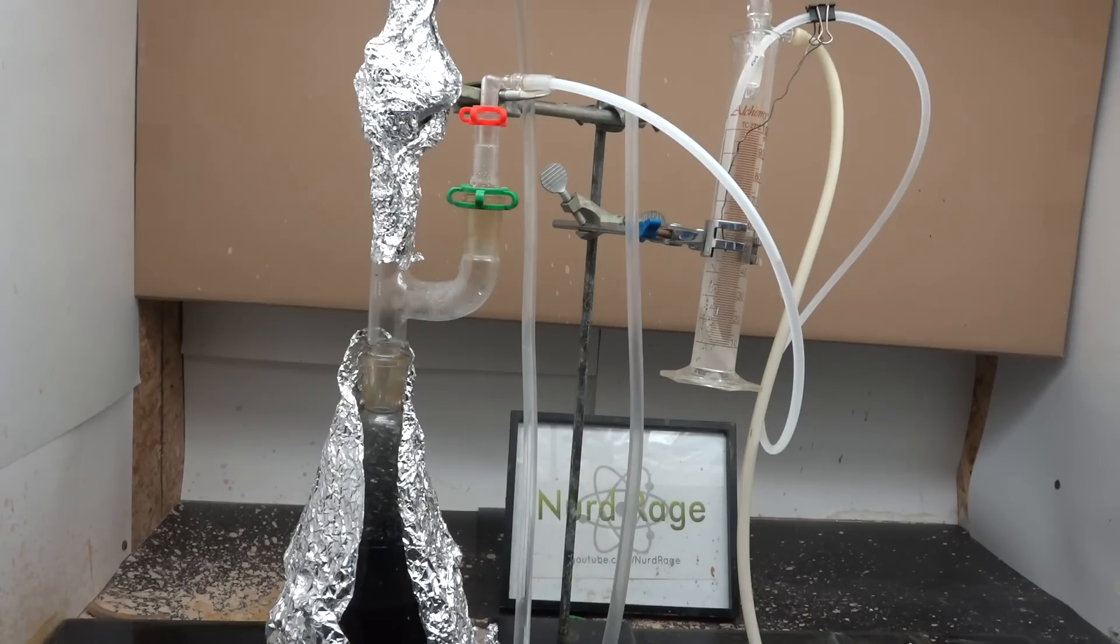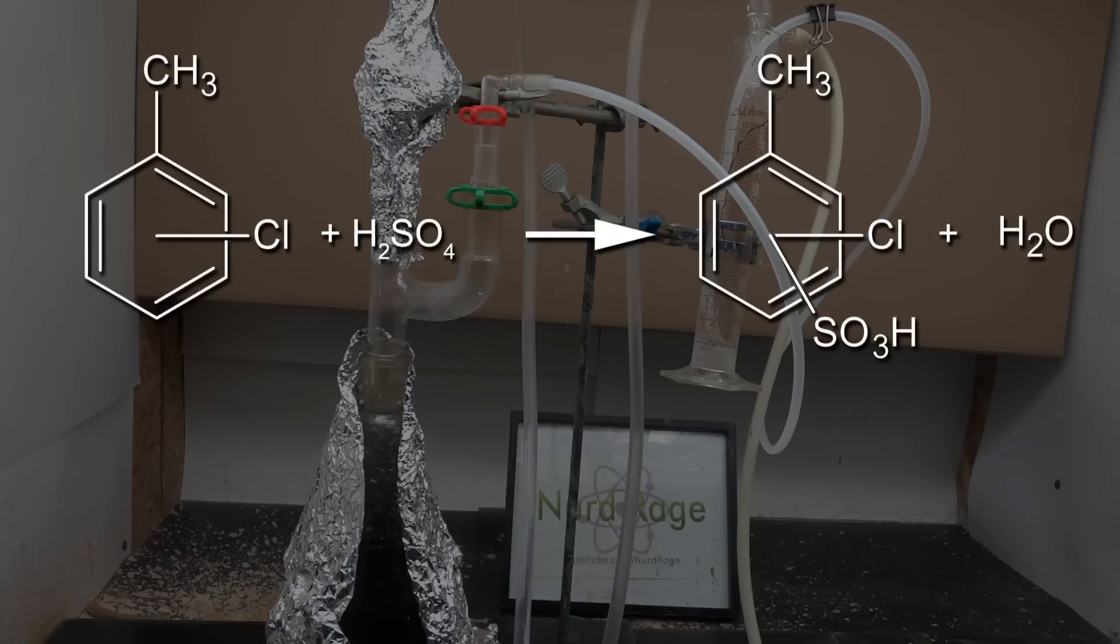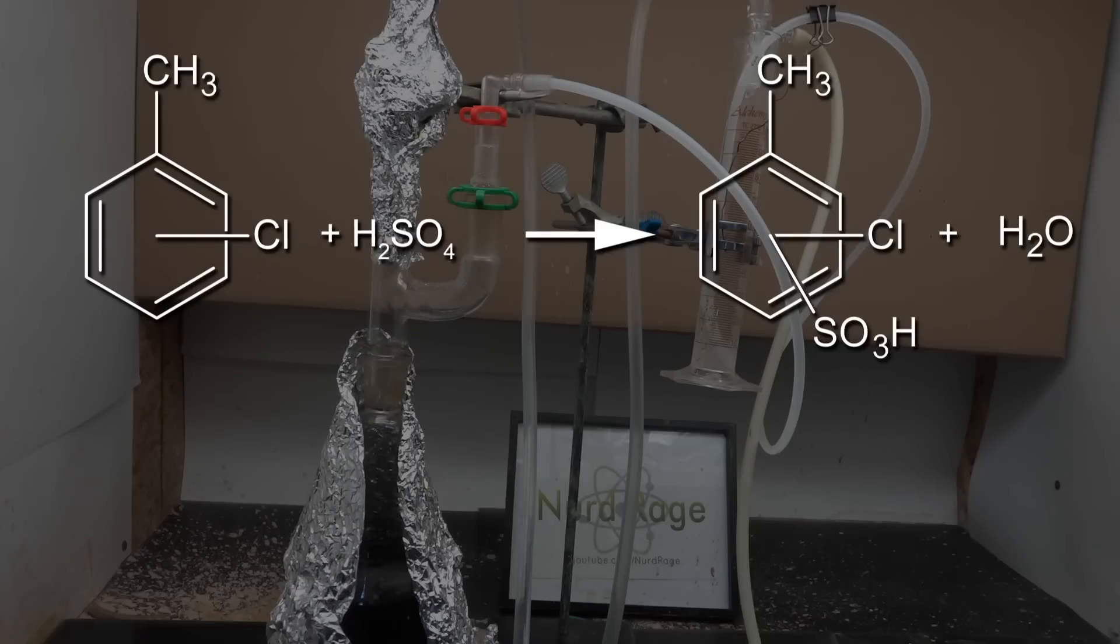Now turn on the heating to 300 degrees celsius and let it boil. What we're doing is sulfonating the chlorotoluene and releasing water. By turning up the heat high enough to boil the mixture the water boils out along with chlorotoluene. The Dean-Stark trap allows us to conveniently separate and return the chlorotoluene and just keep the water. By removing the water from the reaction we drive it forward.